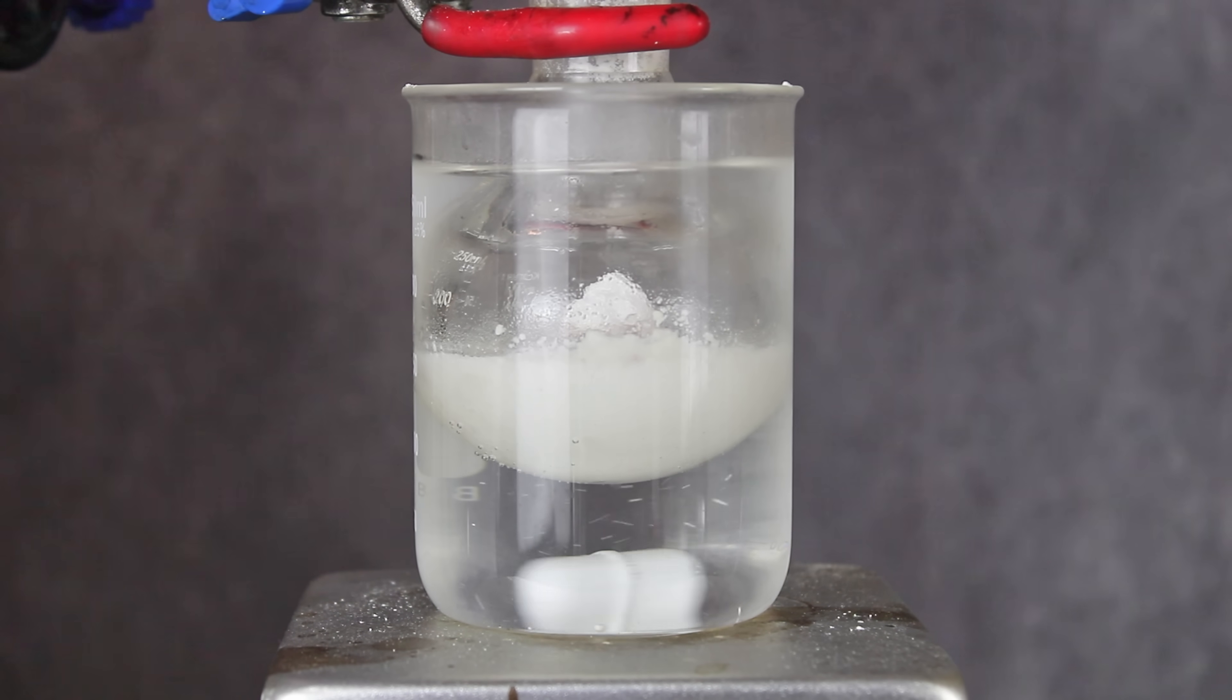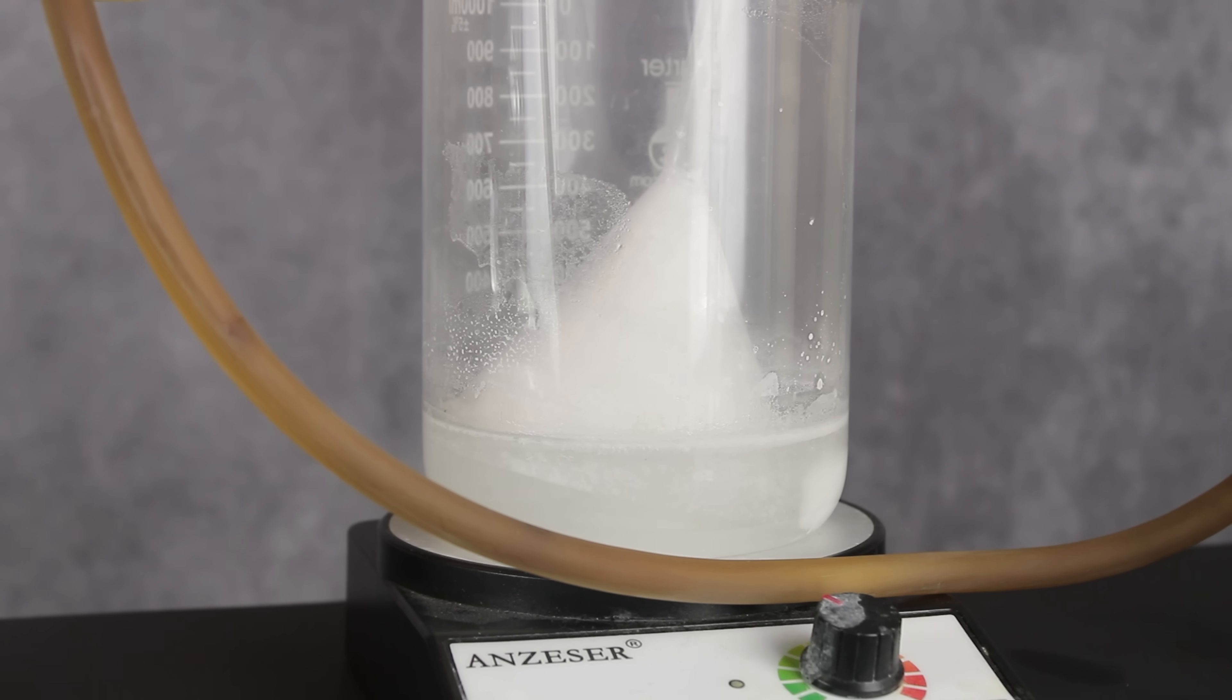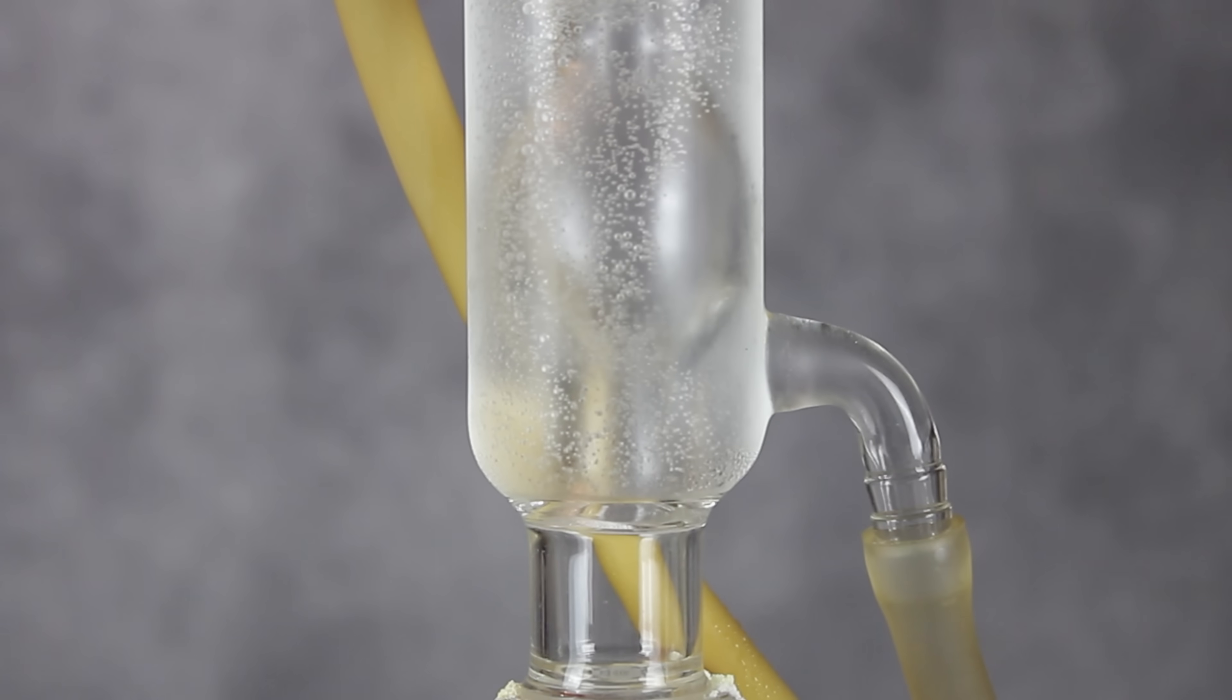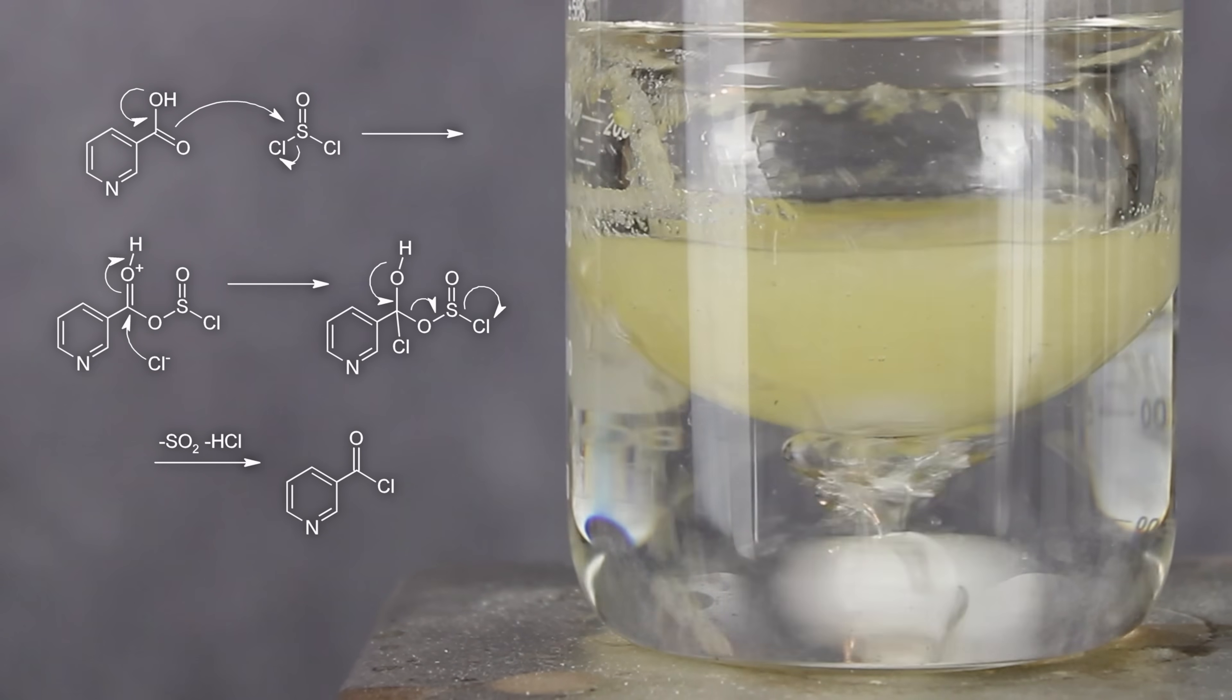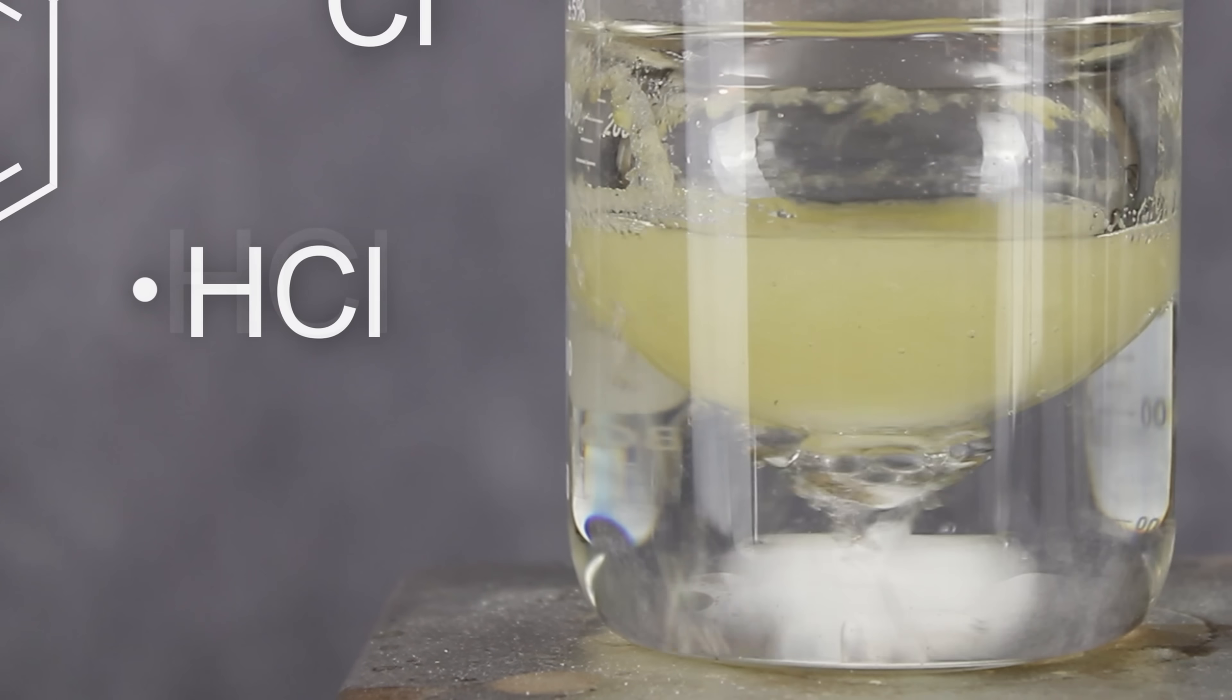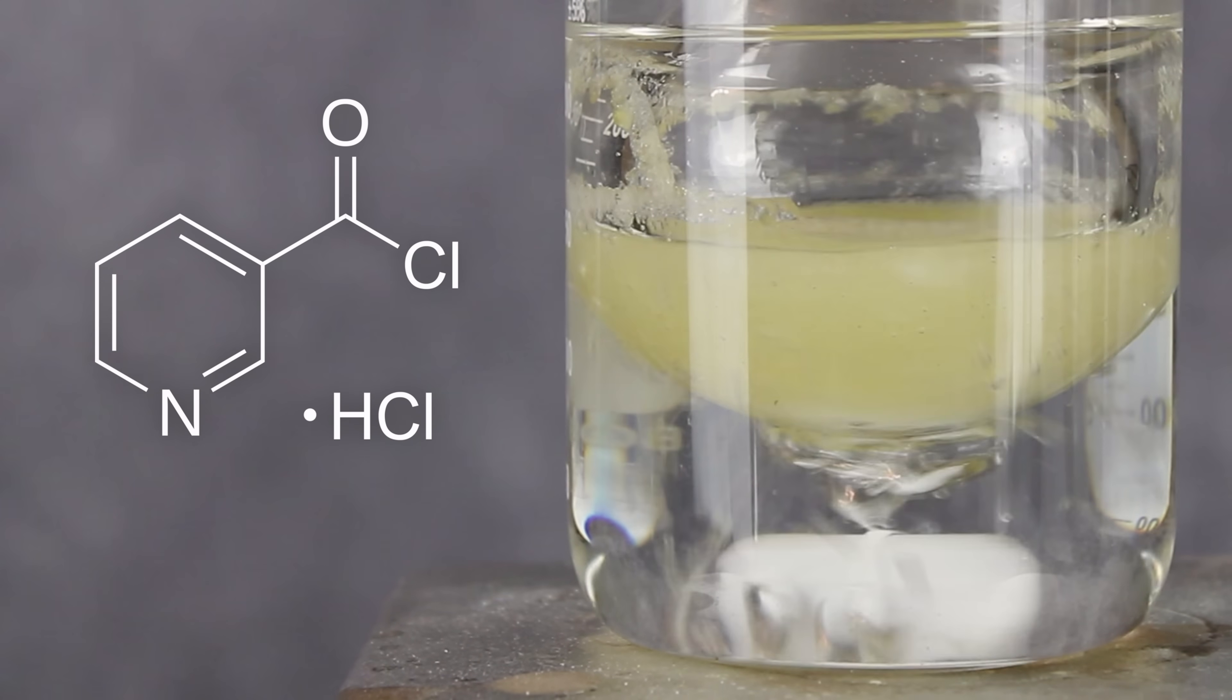Then, with everything added, a reflux condenser was connected, the water bath was brought to a boil, and a bubbler trap was set up to capture most of the noxious fumes. As the thionyl chloride began to reflux, the nicotinic acid was quickly converted into nicotinoyl chloride, and sulfur dioxide was released from solution. Hydrogen chloride was also evolved, but it reacted with the nicotinoyl chloride's pyridine ring, stabilizing the compound as its hydrochloride salt.